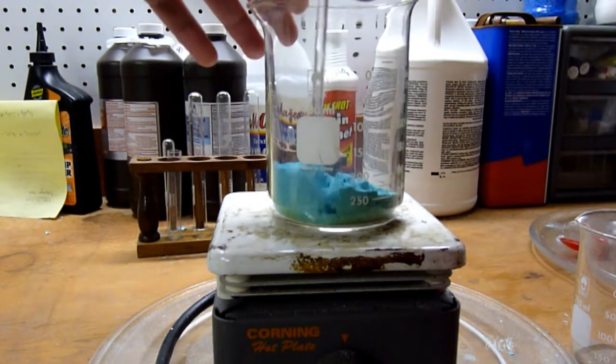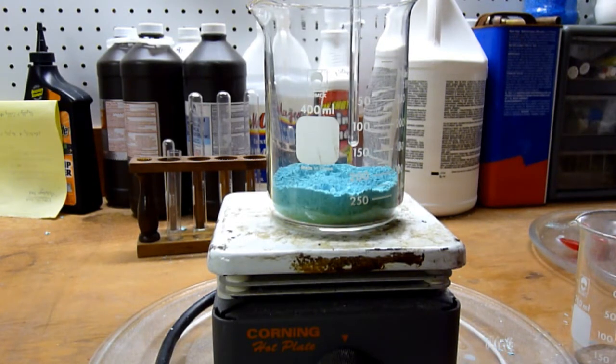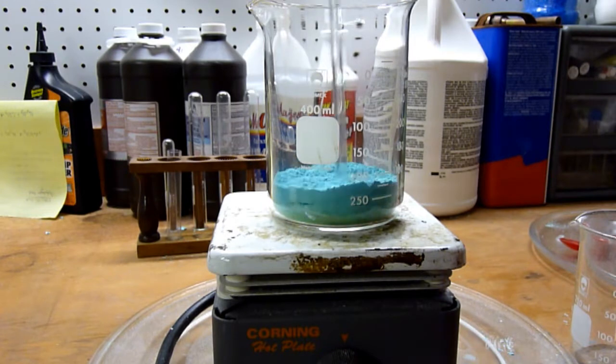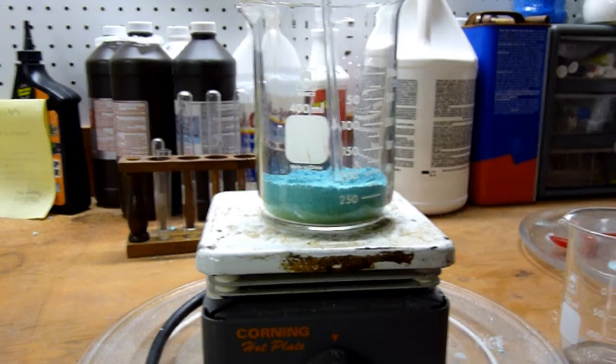Now you can already see the powder near the bottom is starting to turn green and brown and it's getting light and fluffy as the carbon dioxide is giving off. I'll zoom in on the action.